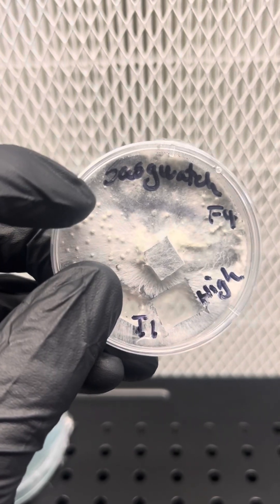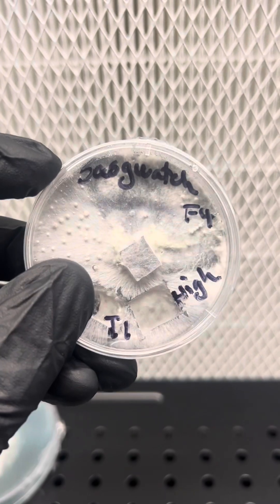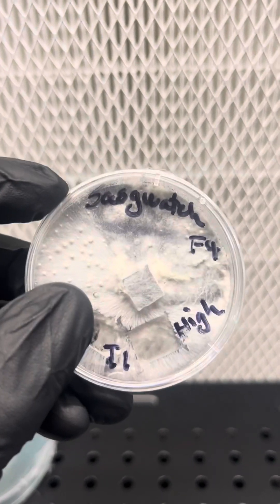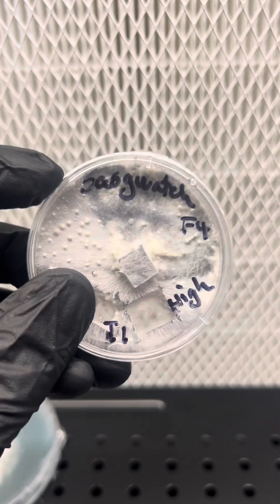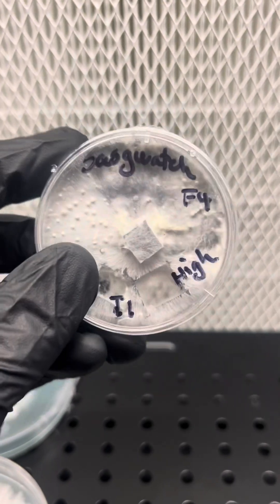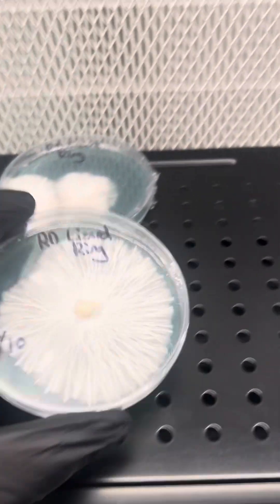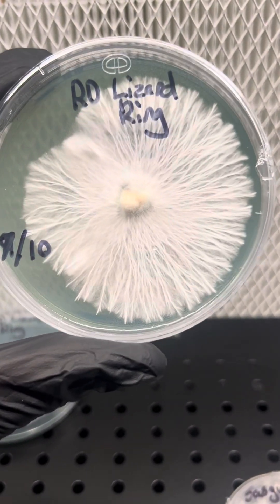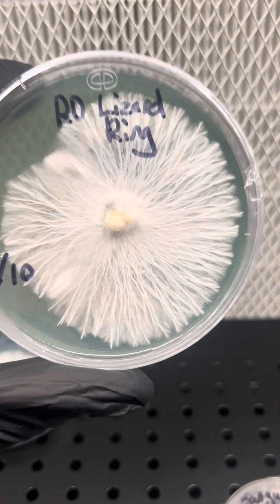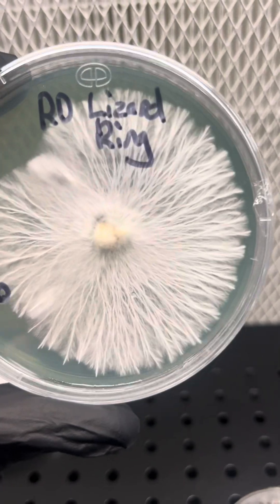The same goes for taking a piece of agar right here and placing it onto a new plate — then you start to isolate that culture and potentially get wall-to-wall, full canopy flushes. I just like referring to plates as my tubs. If I were to take this to a tub, it would grow out very well and uniformly and, in theory, get a full tub of mushrooms.